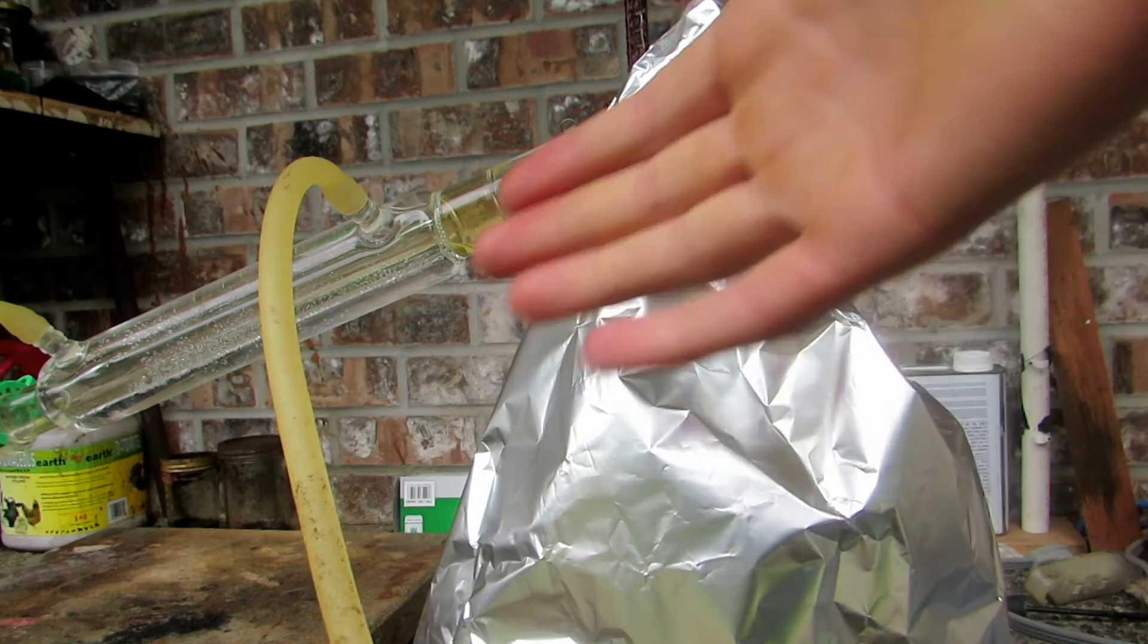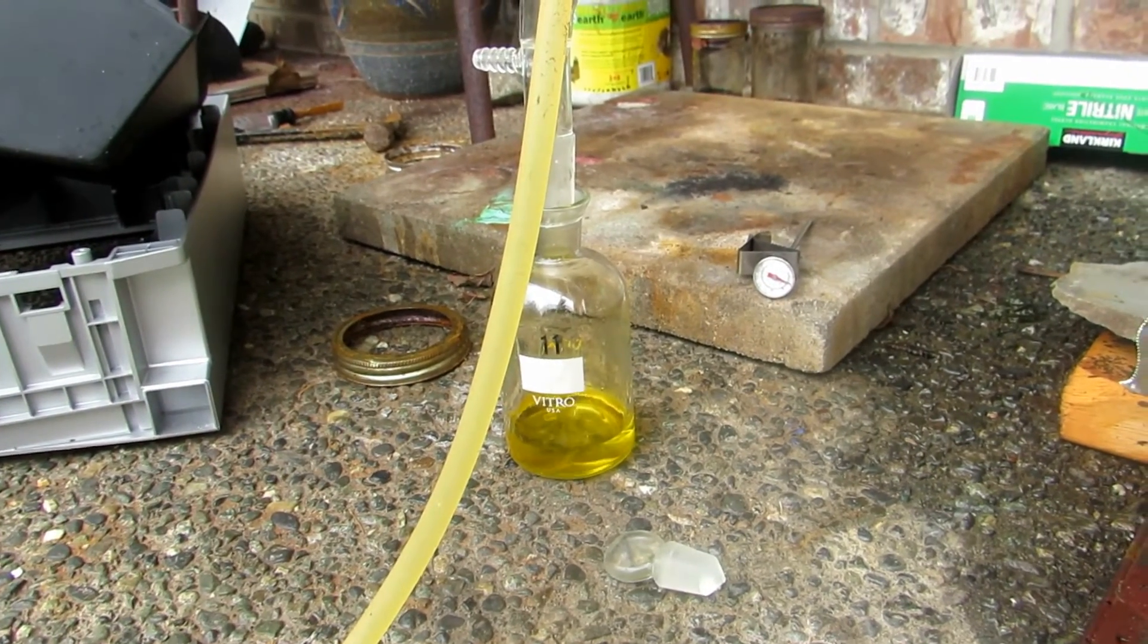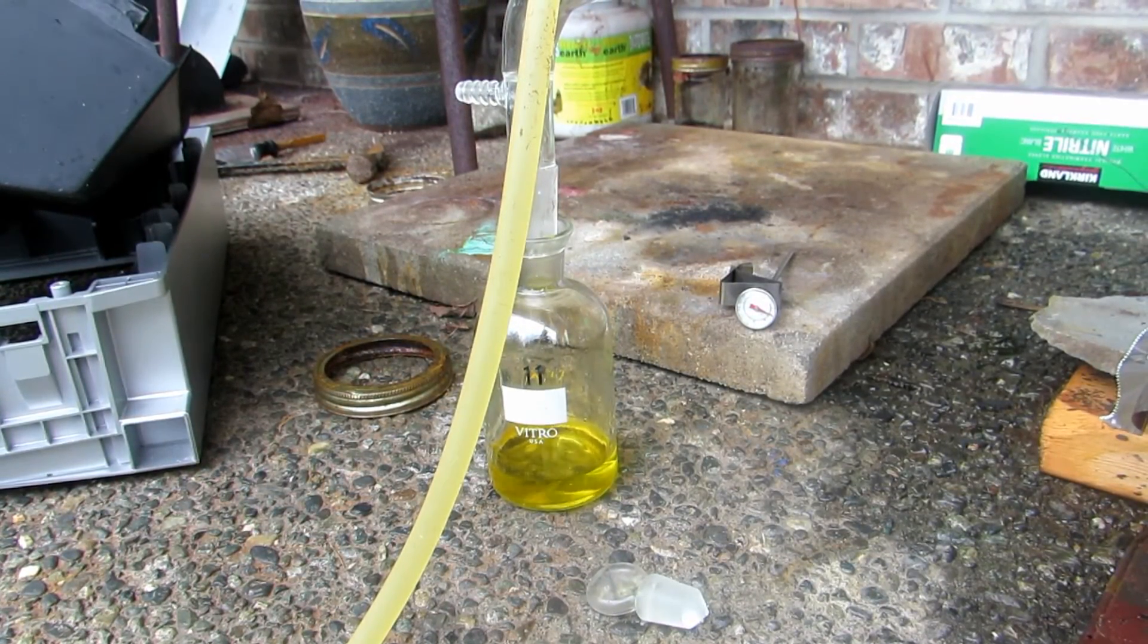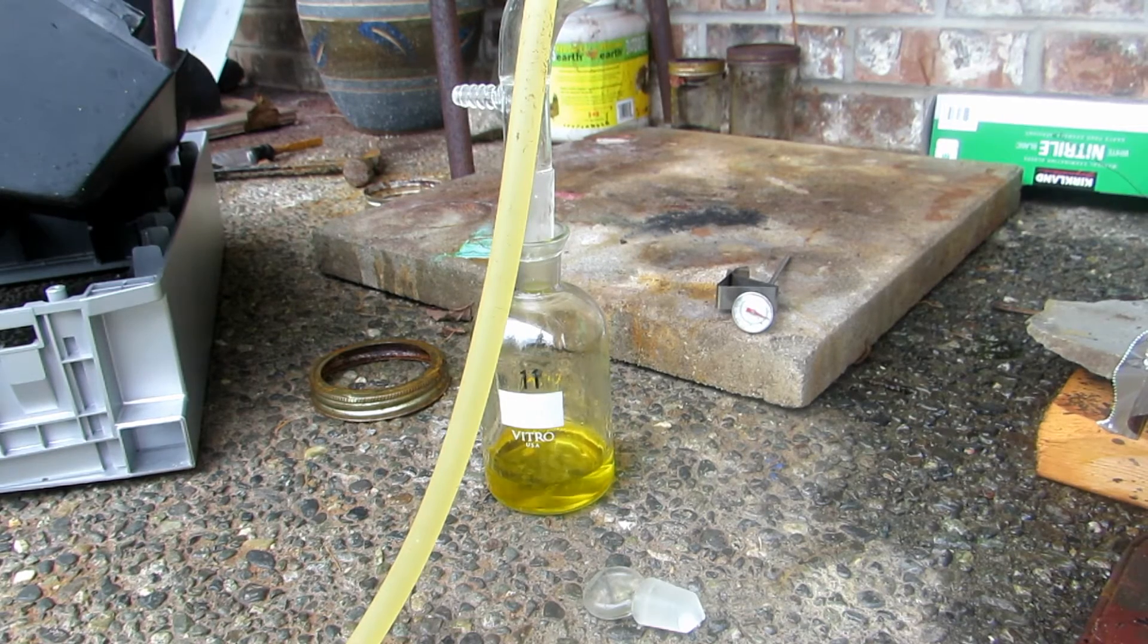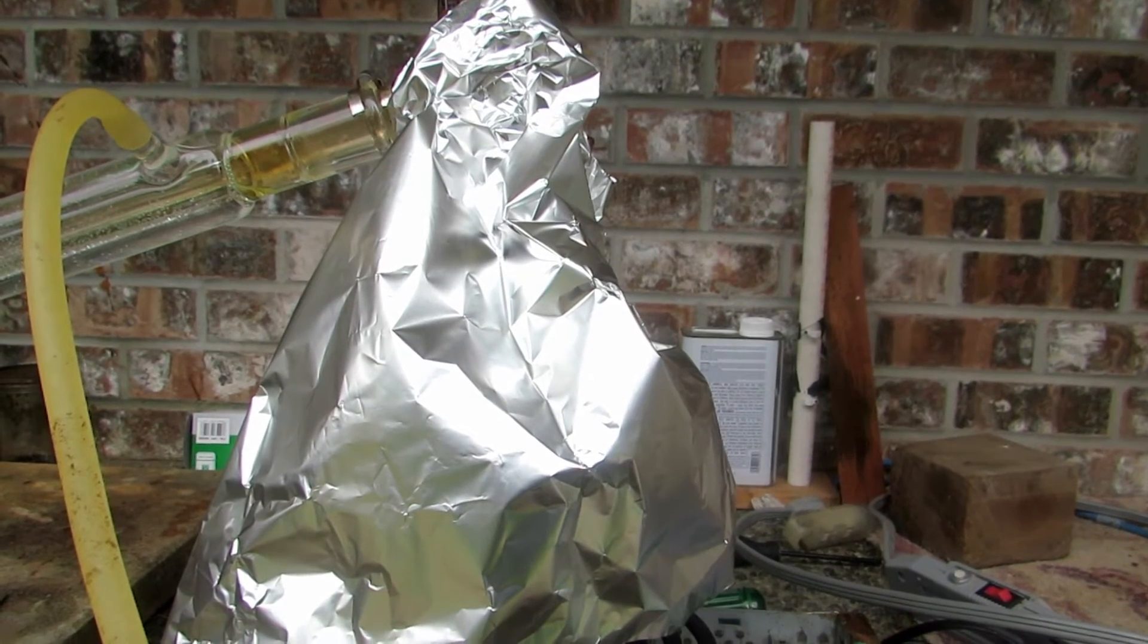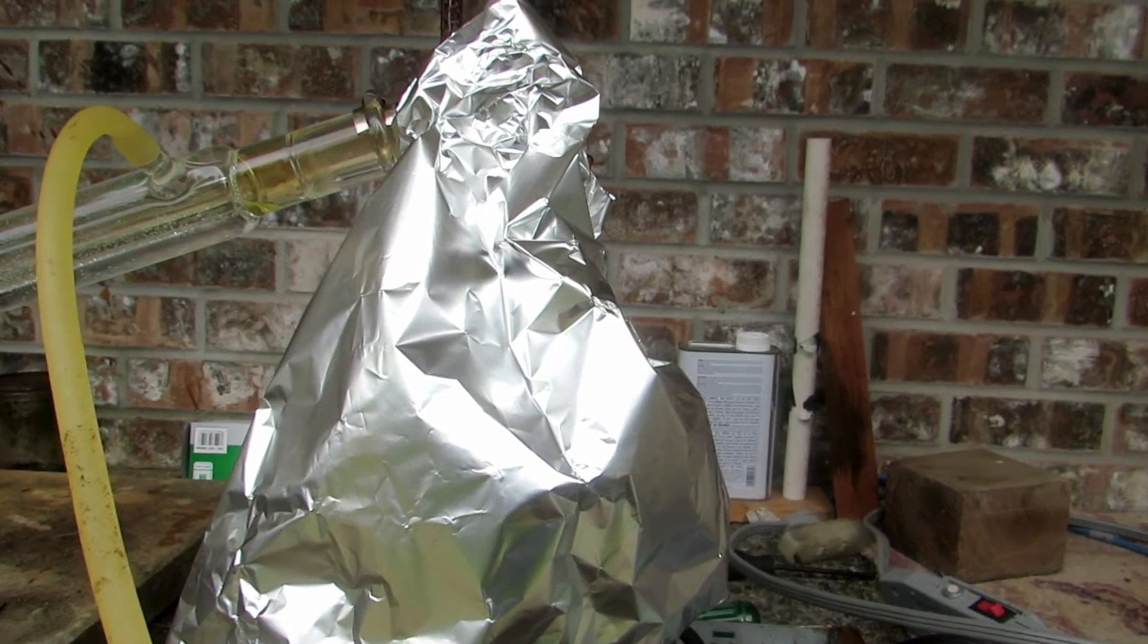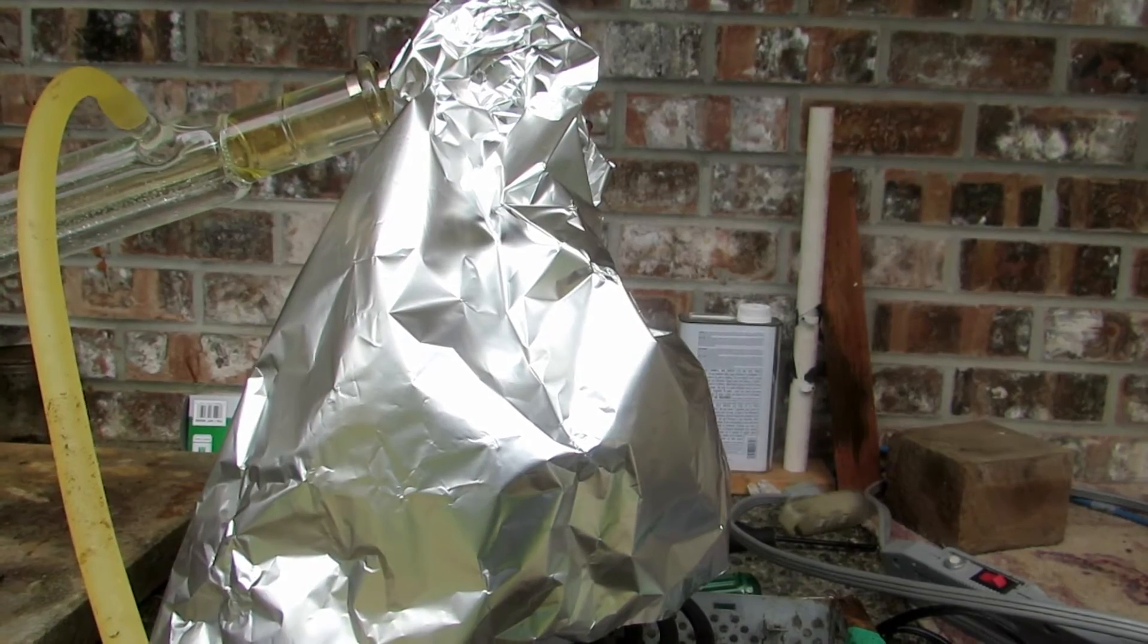And anyhow, so as you can see, the column has more or less cleared up. And we are collecting nitric acid. And the distillate coming over now is much clearer, but we had some nitrogen dioxide from before which contaminated the first few bits. So we have this yellowish product. It's not really going to affect the purity a huge amount. I guess you could swap out the receiving flasks, but it's not going to hinder any reactions or anything. So I don't see why you would need to. Anyhow, so it is a good idea to insulate it because I was finding that it was having a hard time getting all the way over. Mainly because my joint, I think nitric acid reacts with the mineral oil or something. The mineral oil was being dissolved by the nitric acid, so it started leaking out the joint. So I had to put some sulfuric acid in there as a sealant and then insulated. It was a big mess. Anyhow, it seems to be working pretty fine now. So I'll meet you back as soon as this is all done.